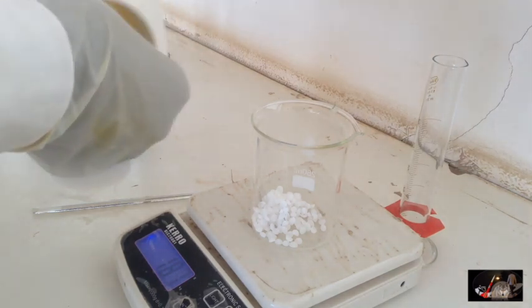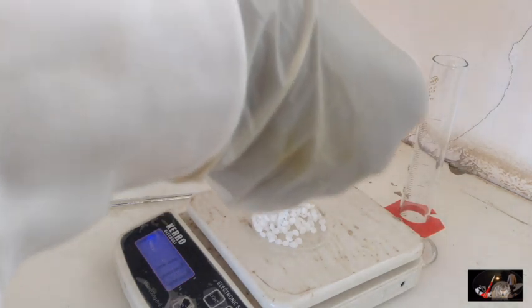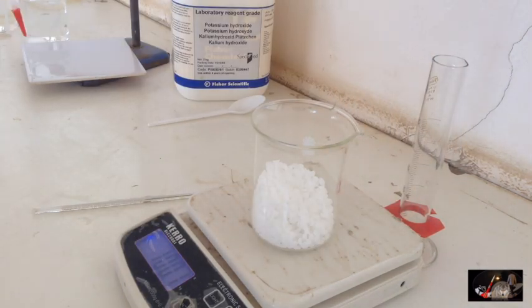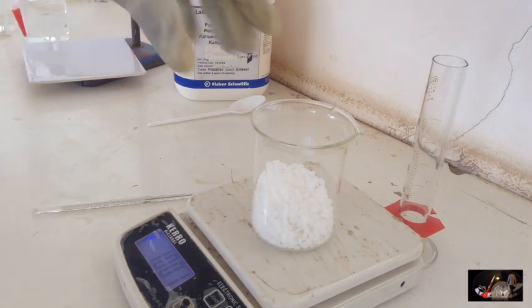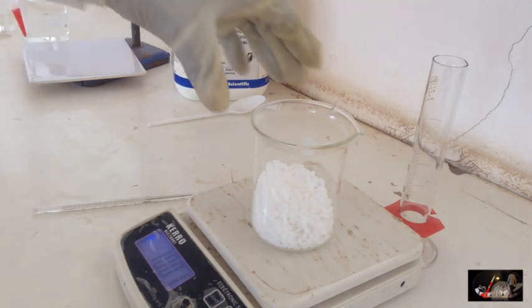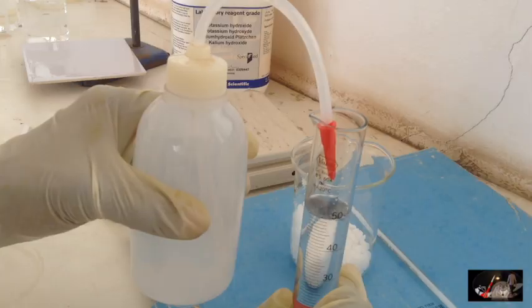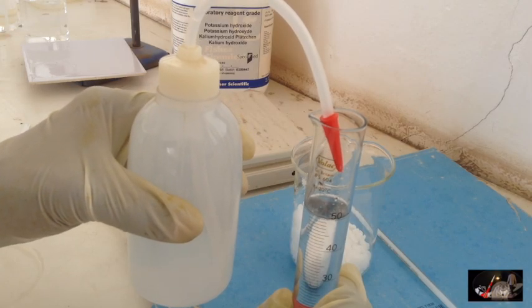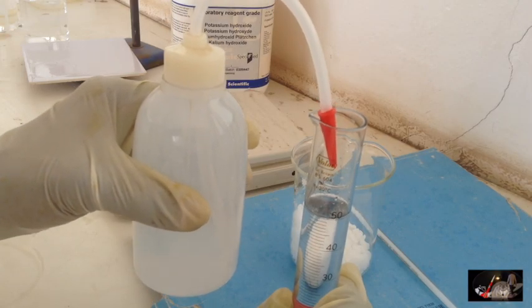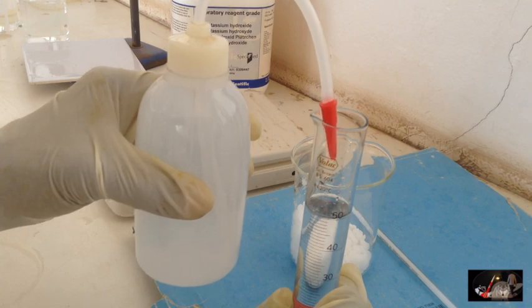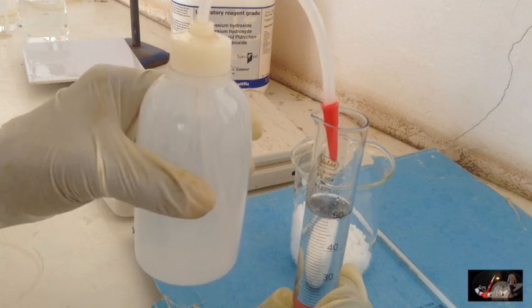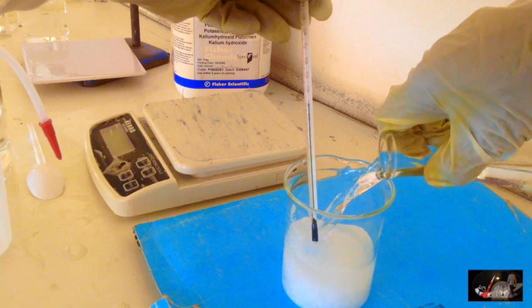To begin this process, you have to weigh 100 grams of the potassium hydroxide pellets. I will be using 300 grams of the KOH because of the quantity of KNO3 crystals I need. For every 100 grams of KOH, you need 200 milliliters of water to dissolve the salt. Be careful during this process as it is an exothermic reaction, meaning heat is given off.